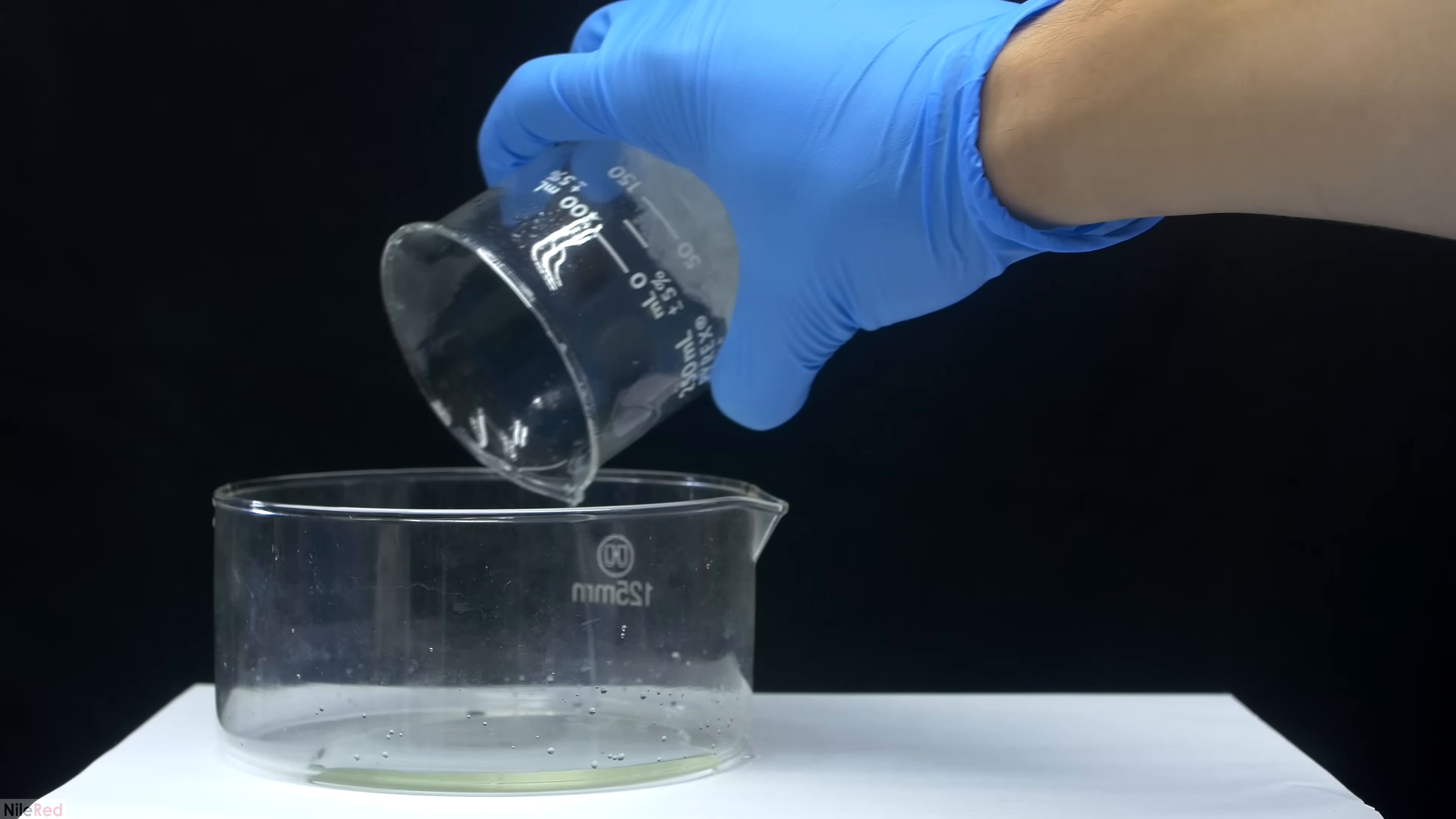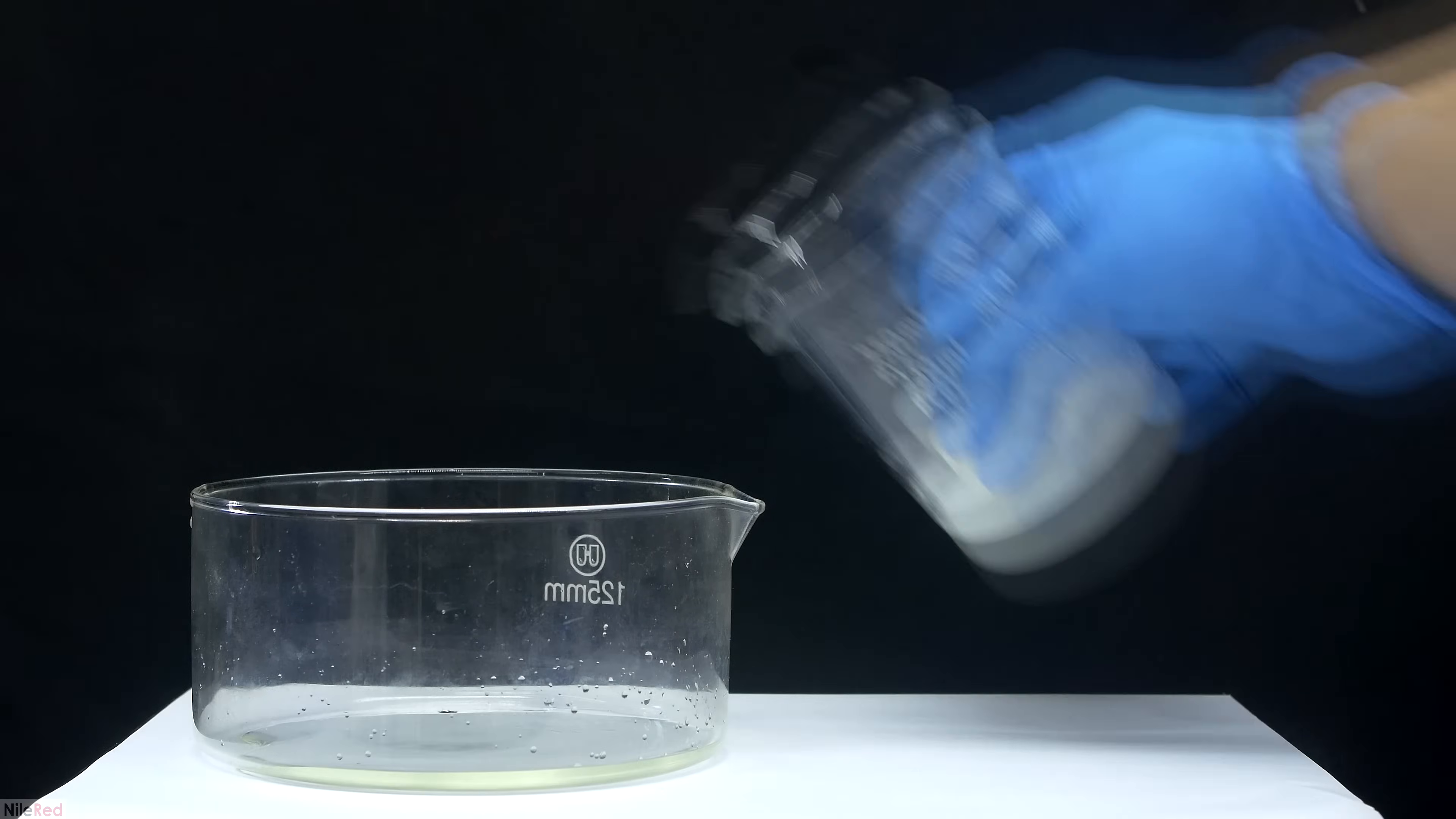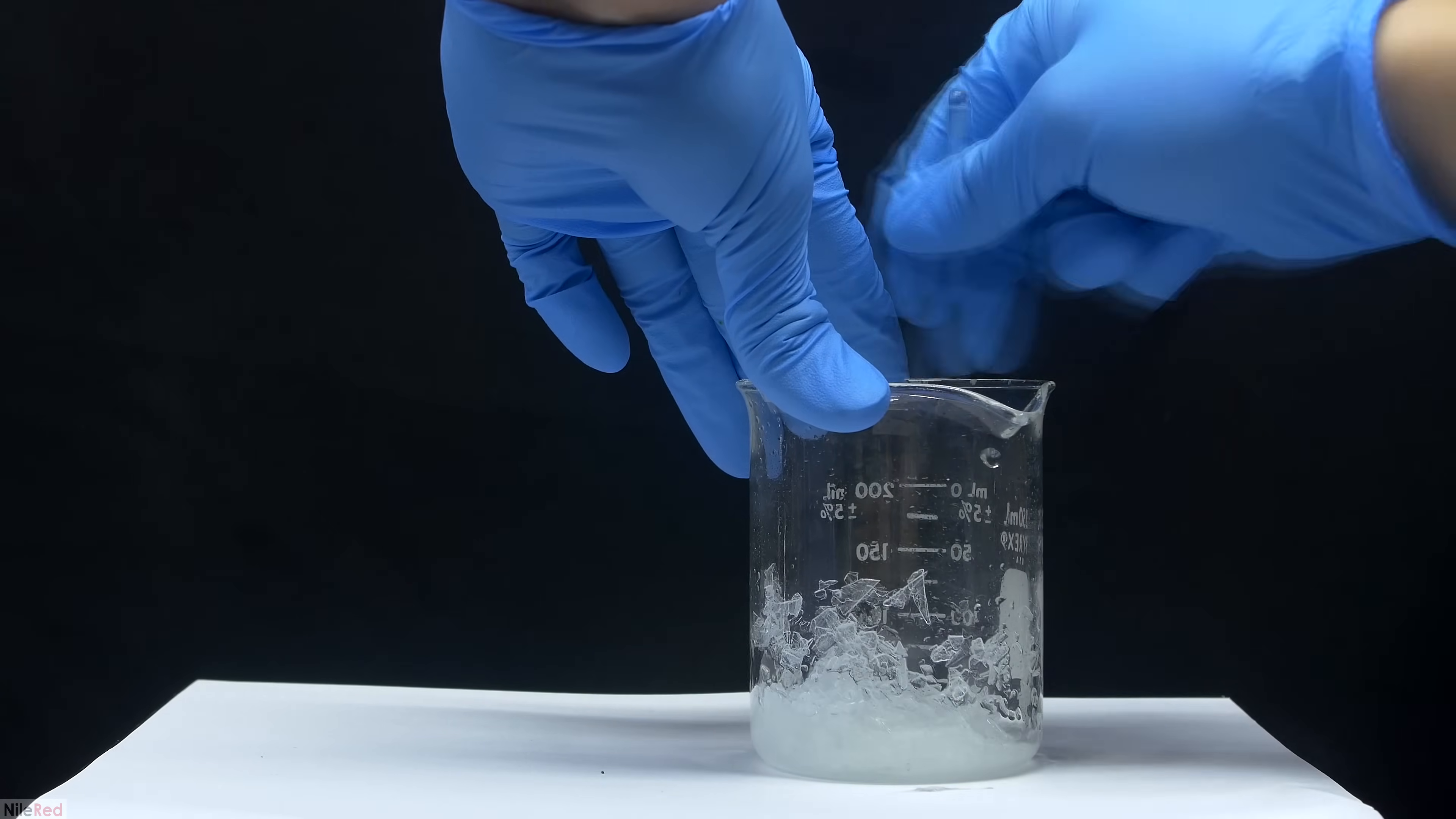The first thing that I did was dump out any excess liquid. I then placed the beaker on the side, let more liquid pool at the bottom and then I dumped that out as well. When it seemed like most of the water had been poured off, I used a glass stir rod to break up the crystals.